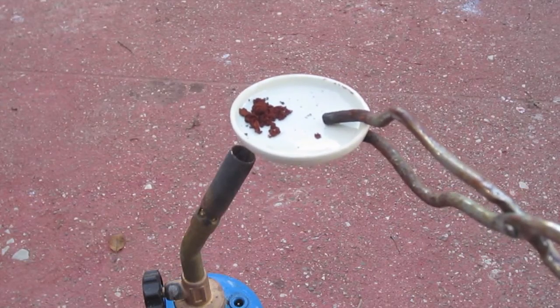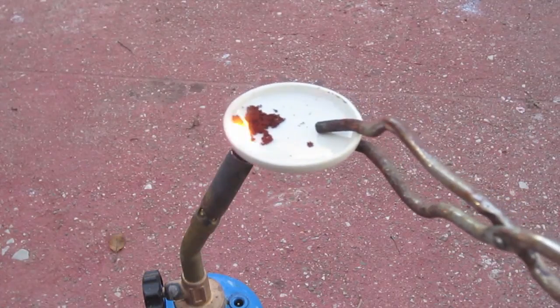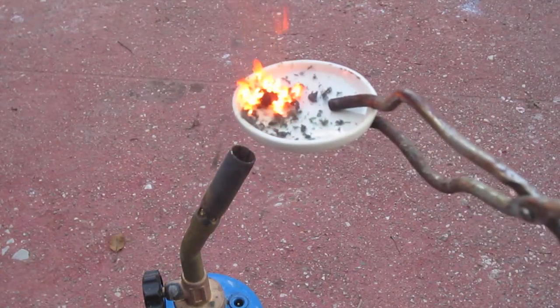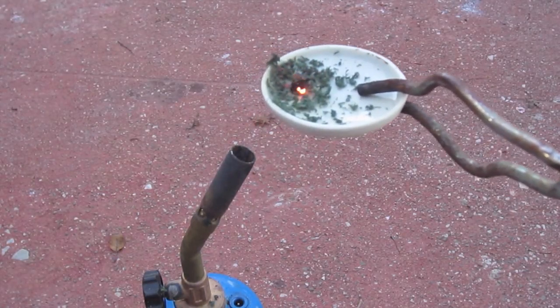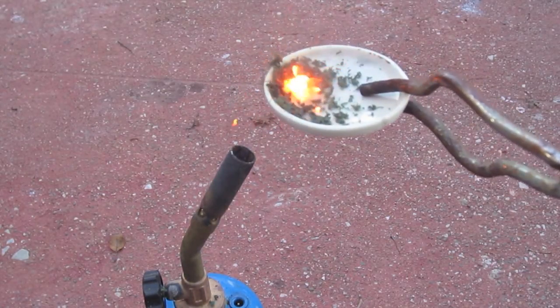Now, this compound is extremely unstable, and when it decomposes by heating, most of the chromium 4 is reduced down to chromium 3, which is why you see that nice green color.